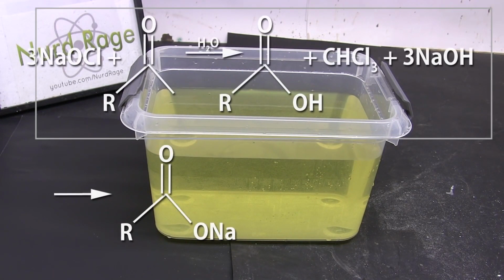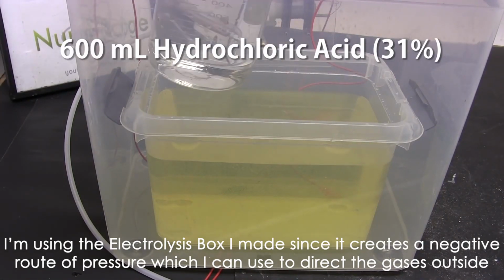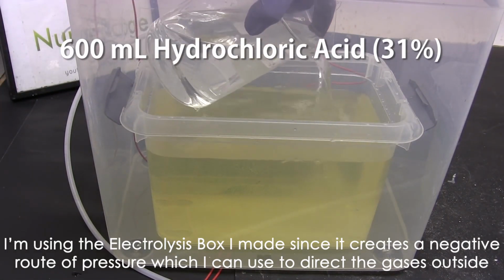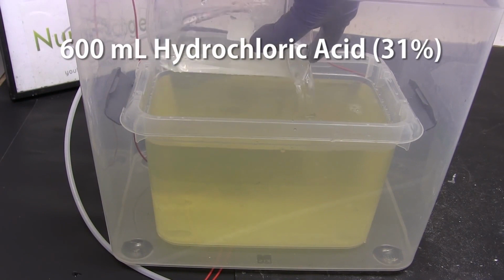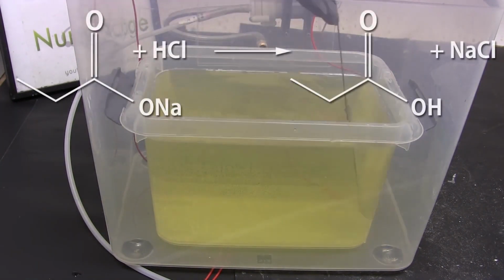Now, the haloform reaction creates an alkaline solution, so the propionic acid is actually in the form of sodium propionate. We'll need to convert to the acid form to recover it. To convert the sodium propionate into propionic acid, we add 600 milliliters of 31% hydrochloric acid. This is a huge excess of hydrochloric acid and will ensure the reactions proceed forward.